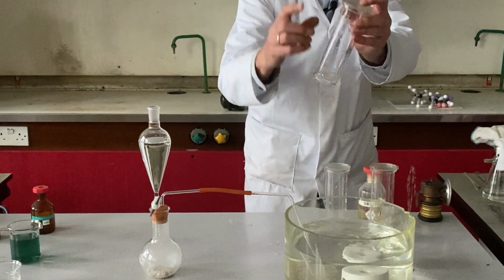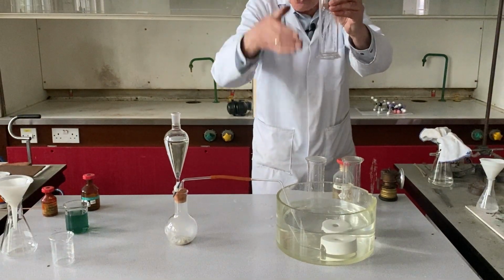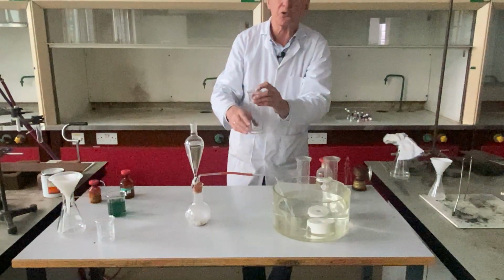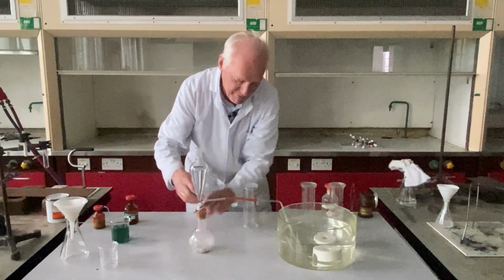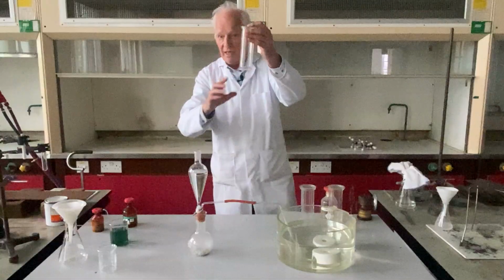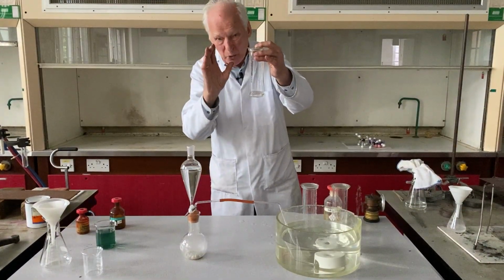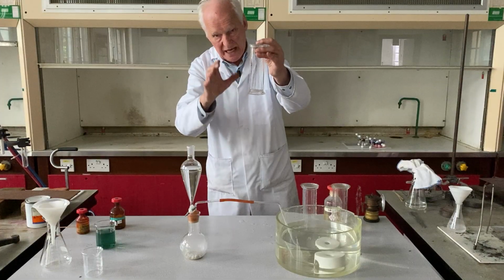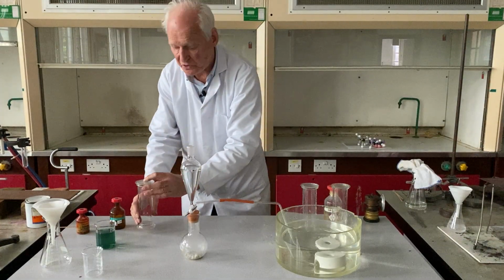You saw there wasn't much acetylene in there, it was mainly full of water. But when the water drained out, it was replaced by air. So what we've got in this jar here is a mixture of air and acetylene, about 10 to 15% acetylene, and the majority of it is air. And there's a very good reason for doing this.